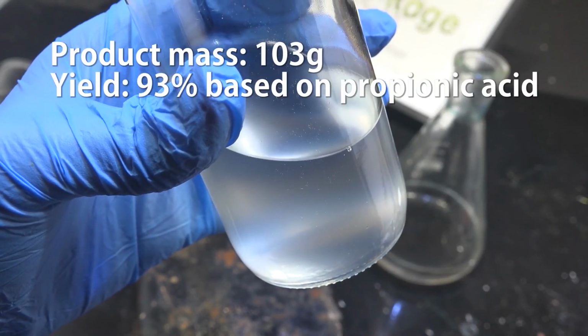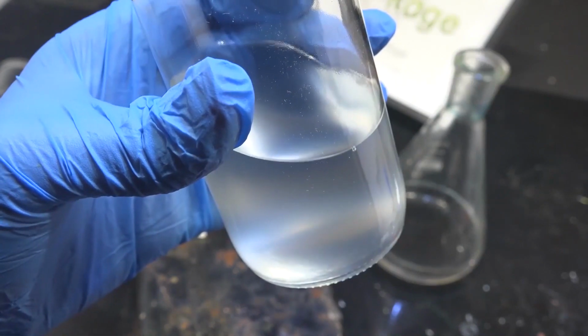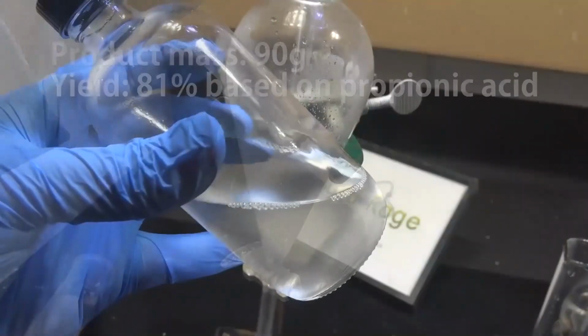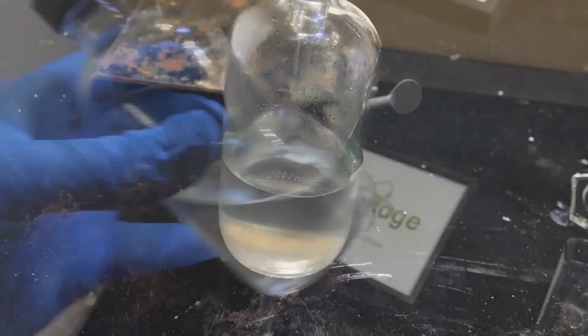The mass of this is 103 grams for a crude yield of 93%. To improve purity somewhat, I'm going to wash it again with 100 milliliters of cold water. And there we go. This is 90 grams or about 81% yield. We're still ahead of the original method.